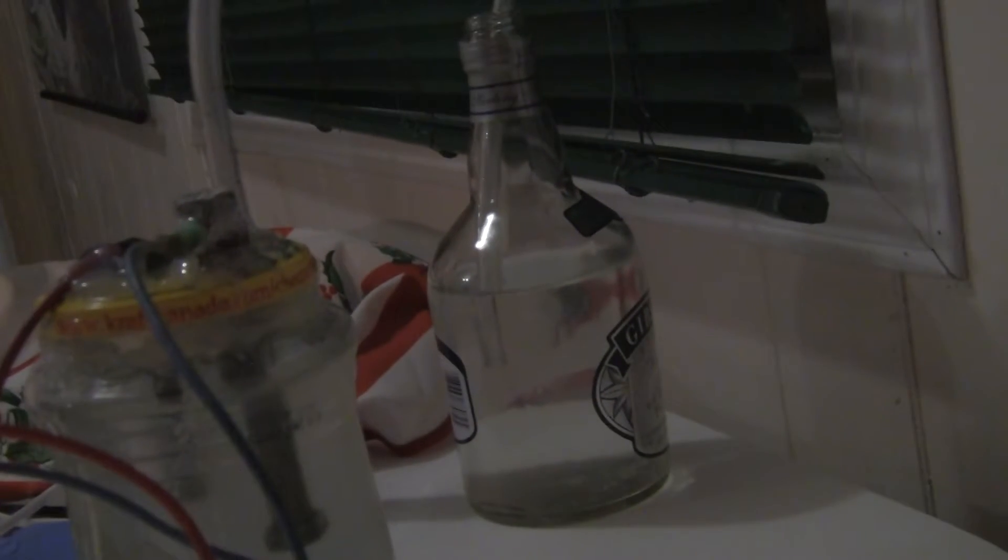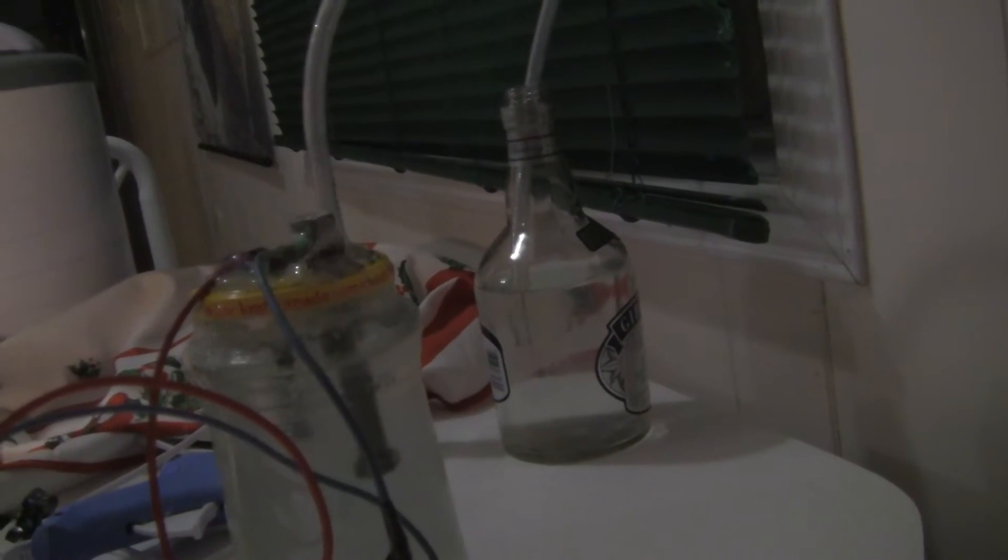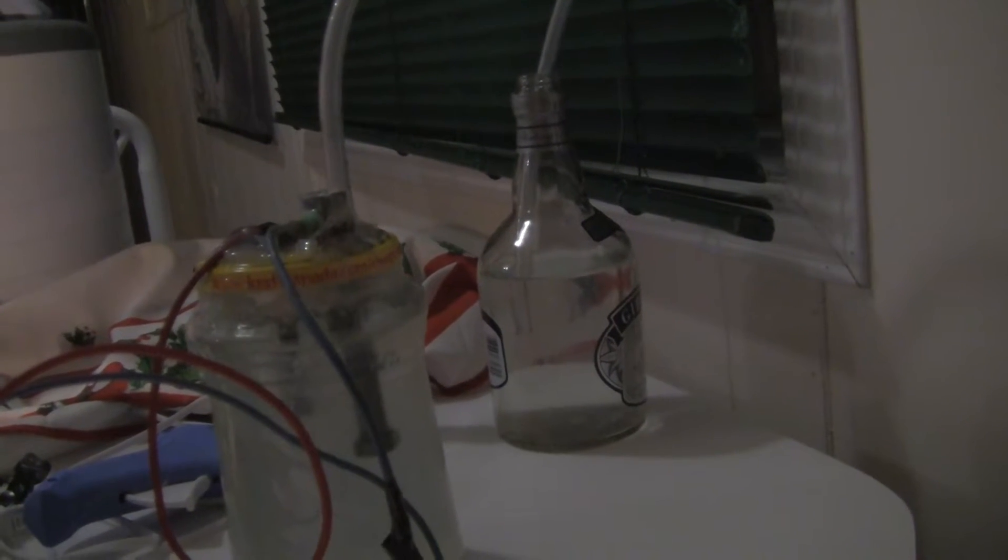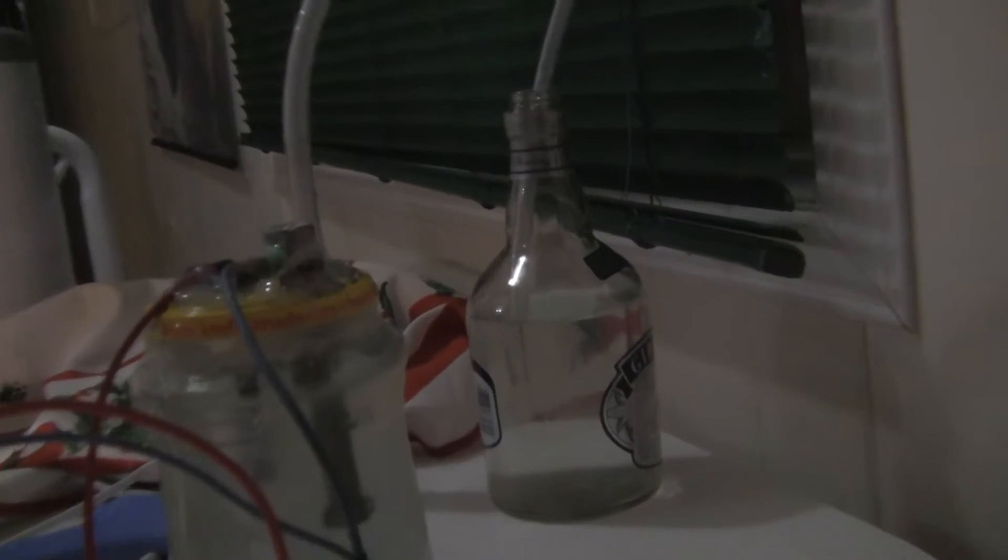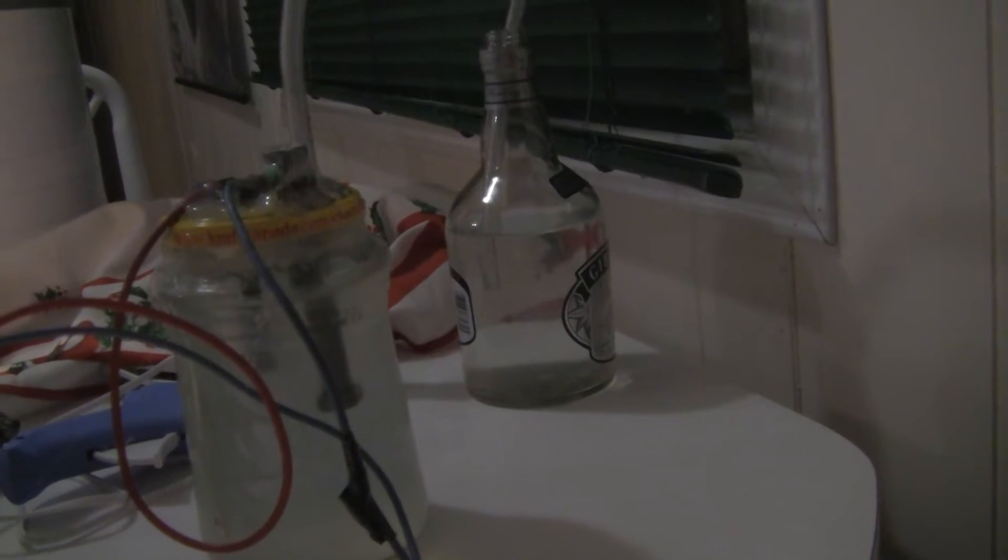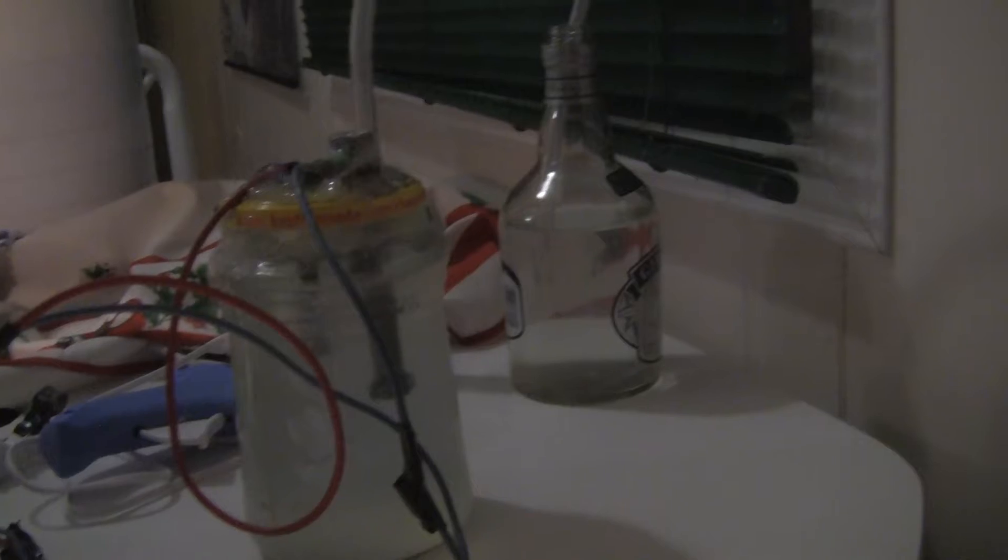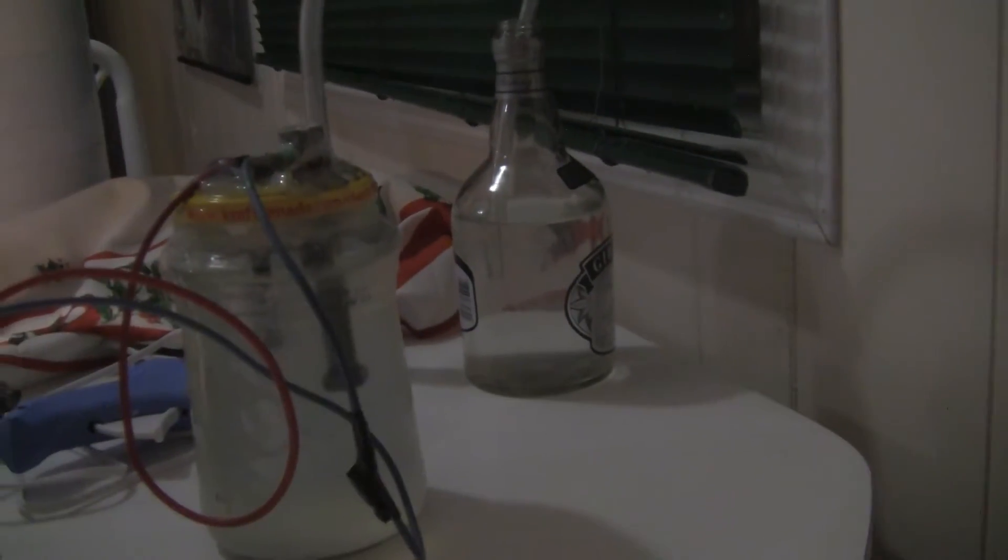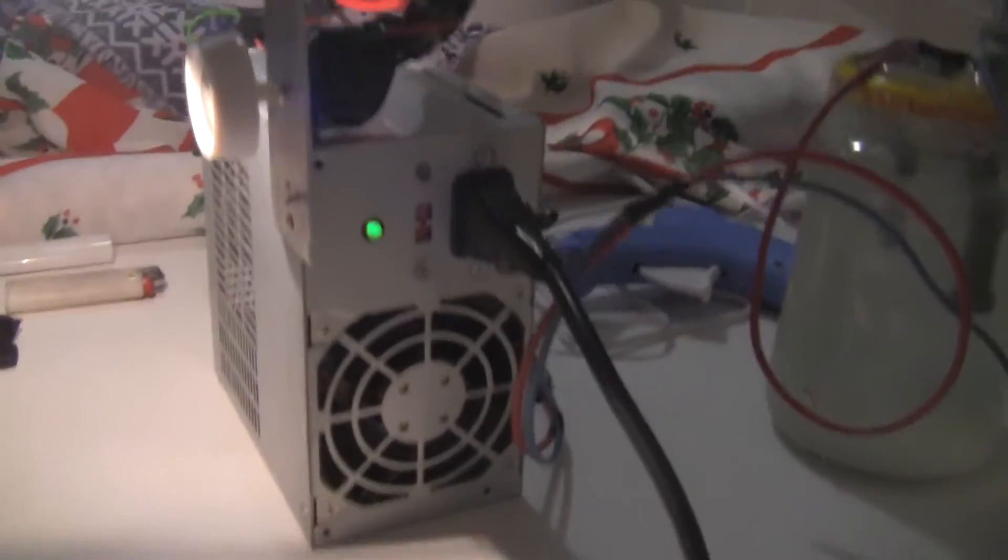And that's lye or sodium, whatever, caustic soda mixture which will scrub the chlorine out. Basically, the mix is suitable for running indoors. Just watch out for the caustic soda mixture because you don't want to be touching that.